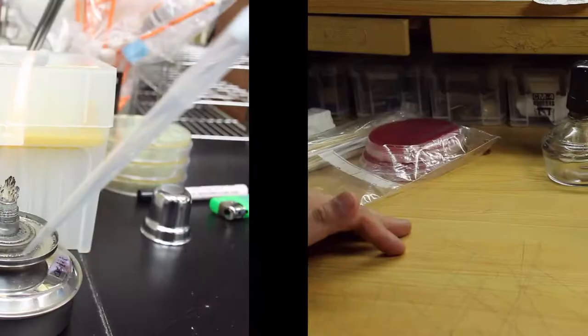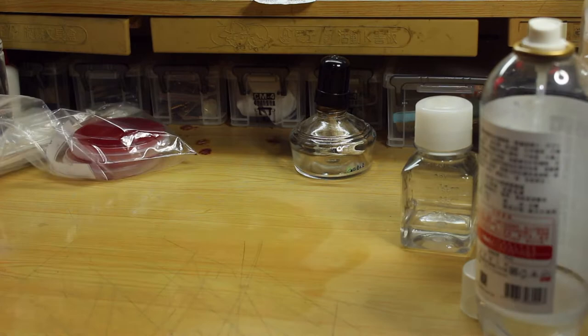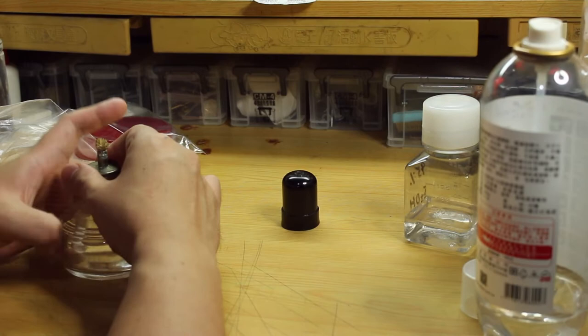First start with a flat surface like this, which is my desk. Clean the surface and wipe it with 70% alcohol. Then get an alcohol lamp. If you have a Bunsen burner or alcohol torch, that will also do. Make sure you use it safely.